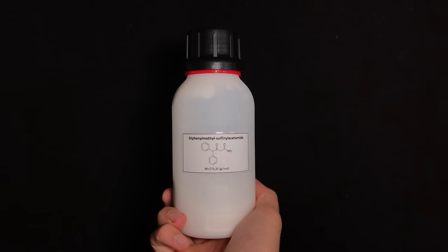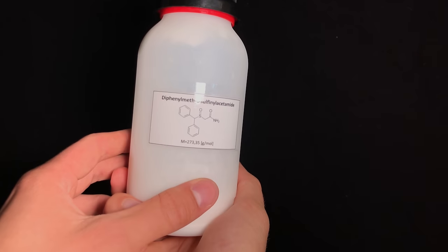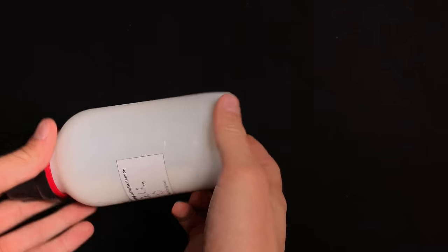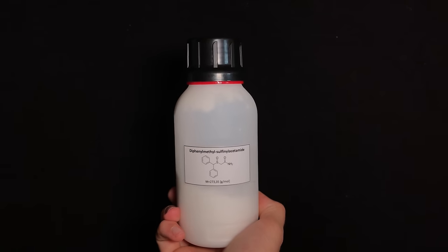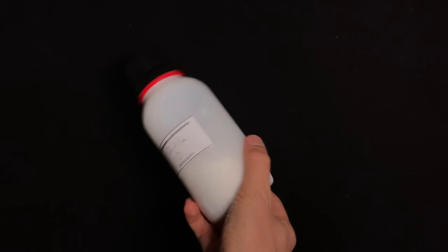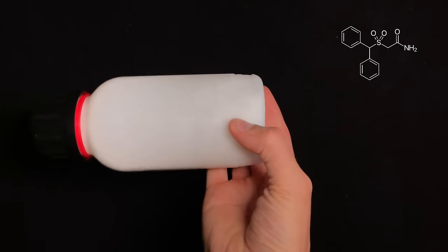And there you go, this is how you make modafinil. Don't eat this stuff, don't sell this stuff, basically don't do anything with it except doing chemistry. I may methylate the amine group or oxidize even more in the future to form the sulfone.